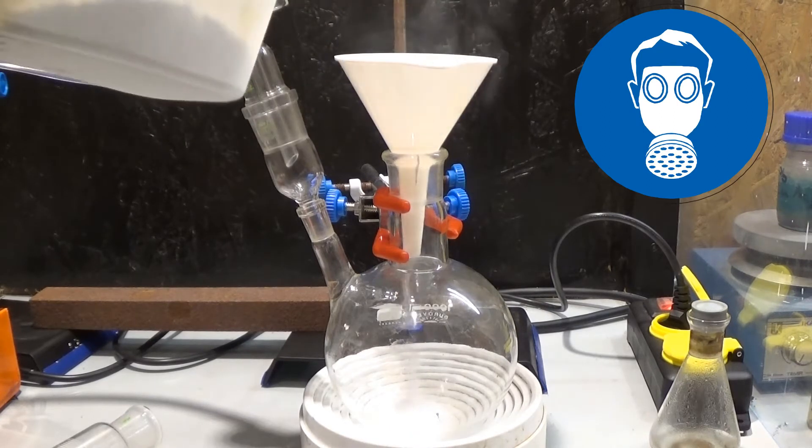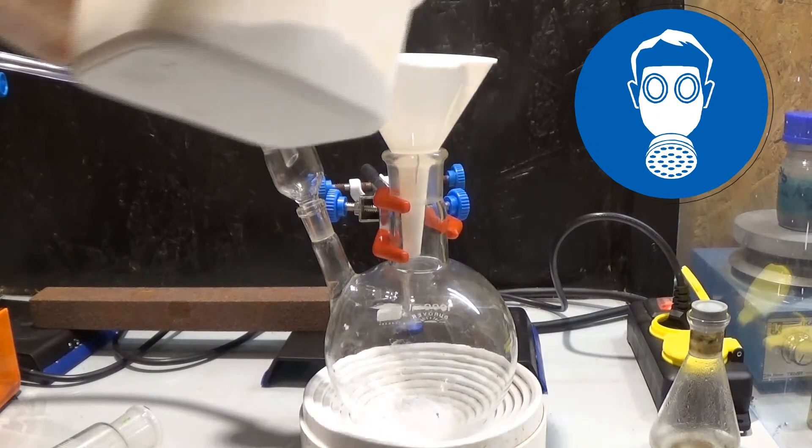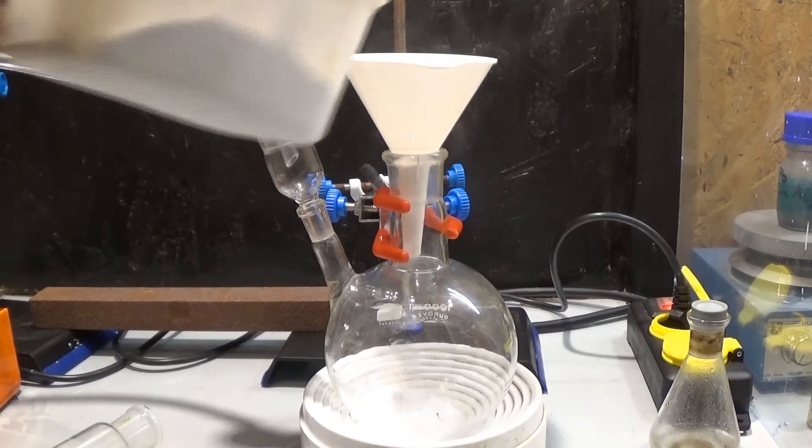This step has to be done in a fume hood or with a gas mask equipped because the TCCA dust can damage your lungs.